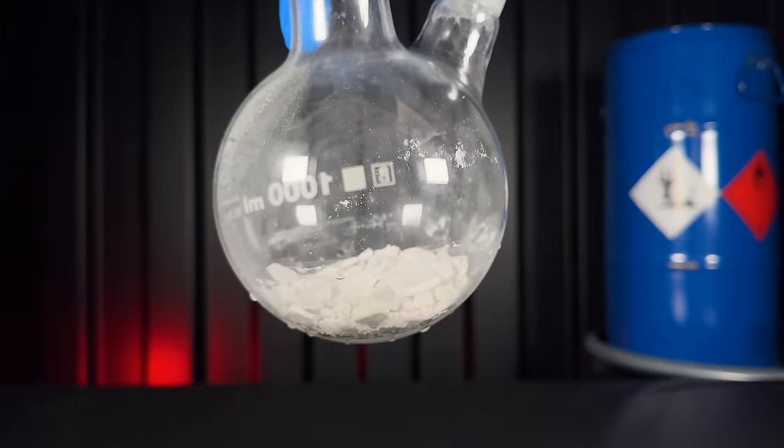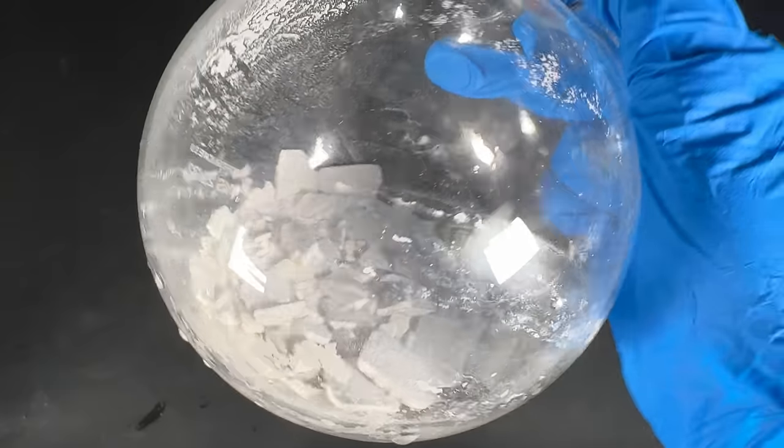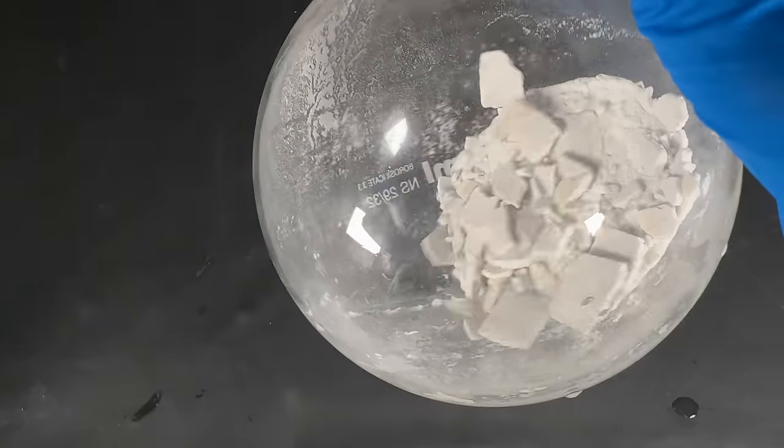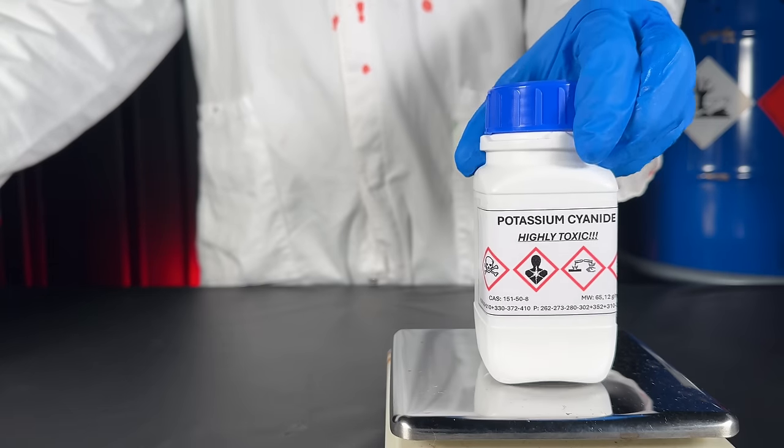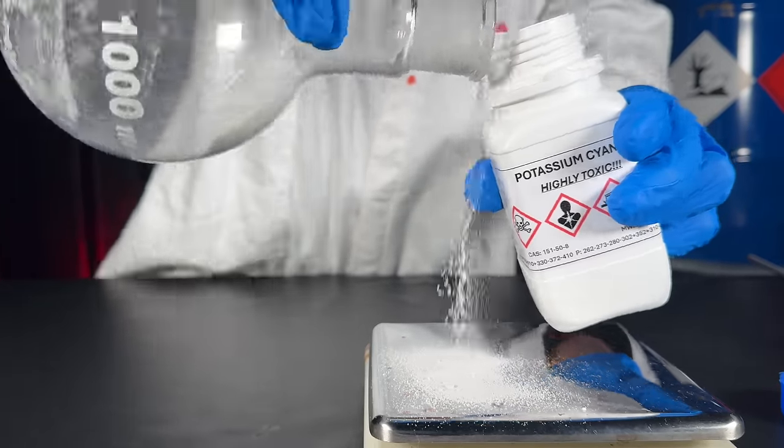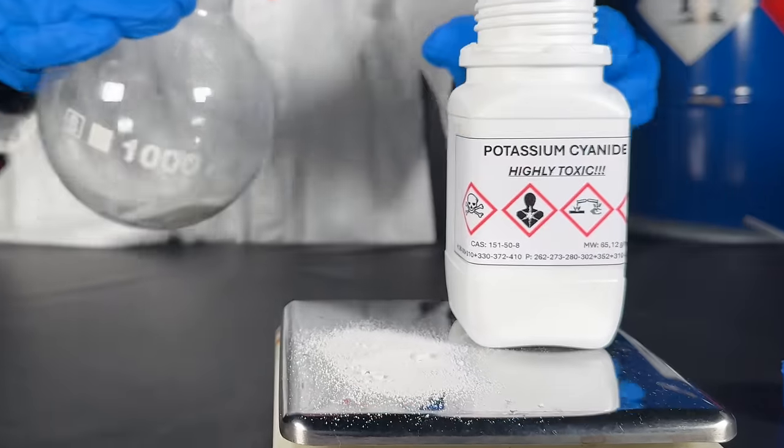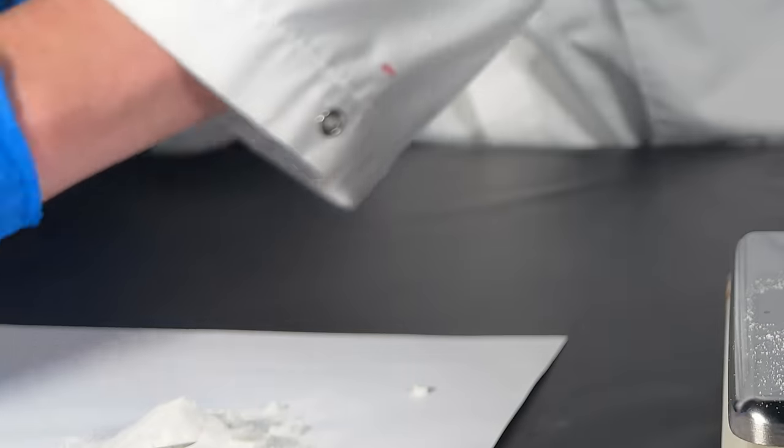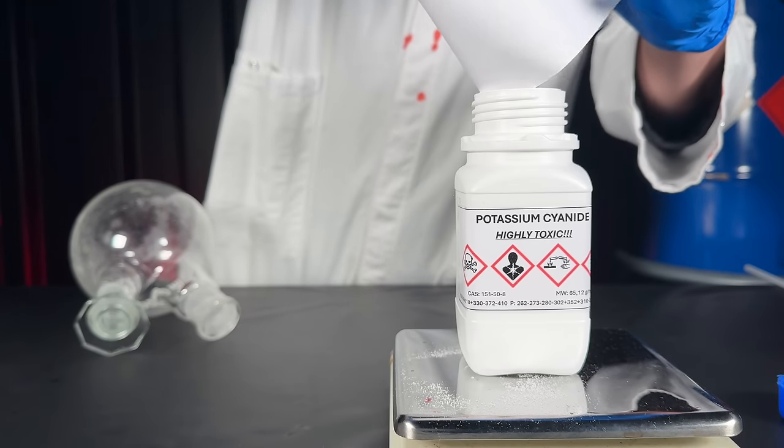And there you have it: white and dry, highly toxic potassium cyanide. To determine the yields, I put it into a pre-weighed storage bottle, and unfortunately this happens. After carefully cleaning up the powdered dust, I put the rest into the bottle.